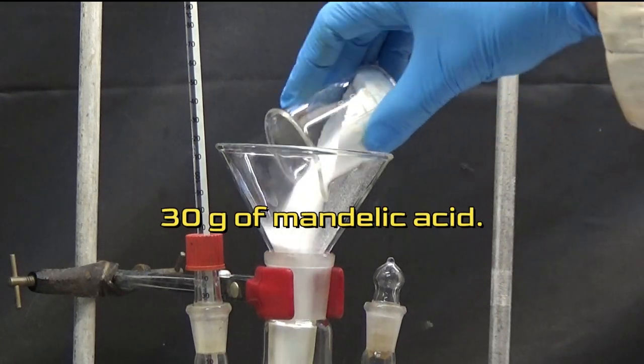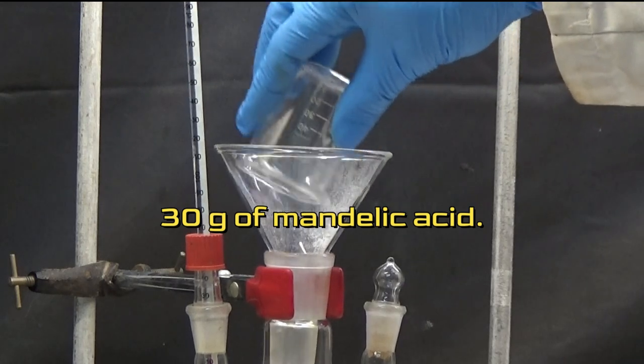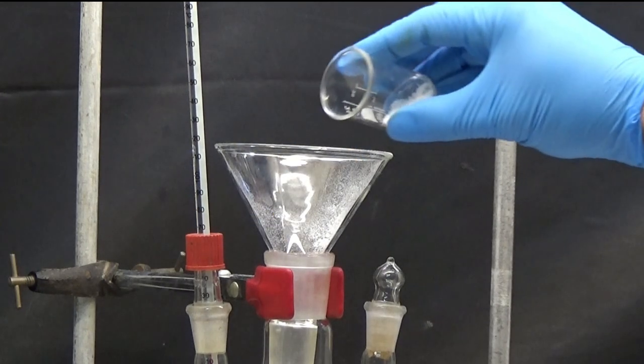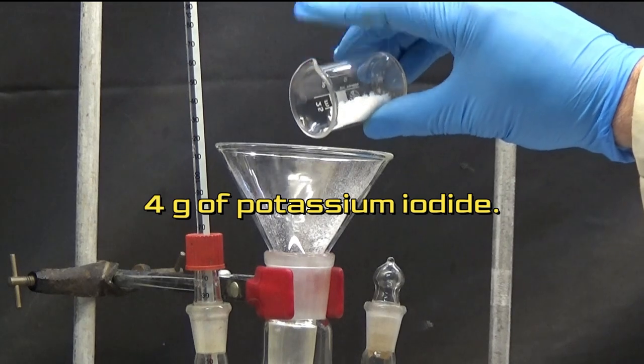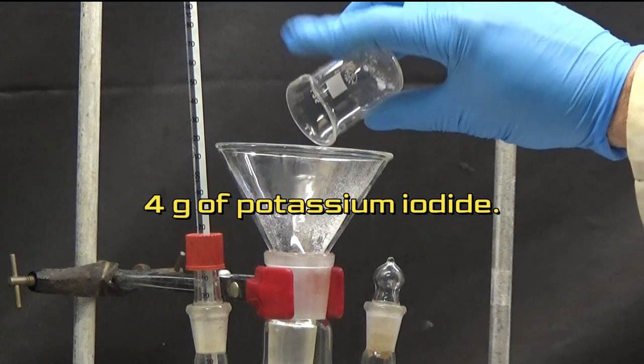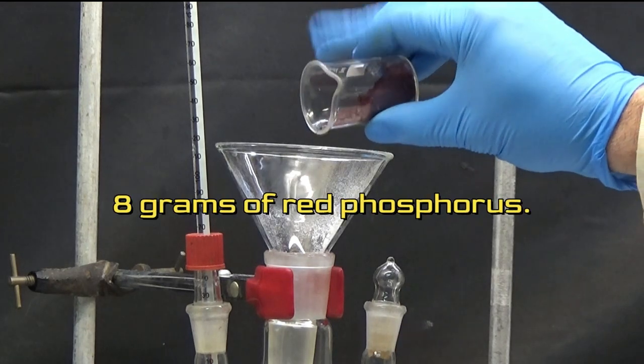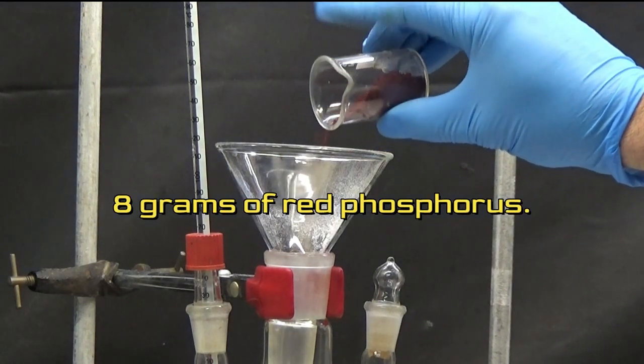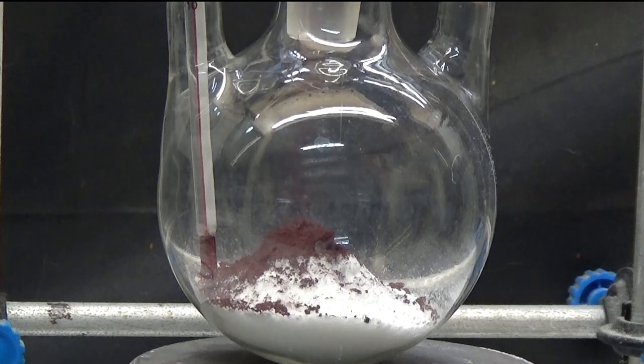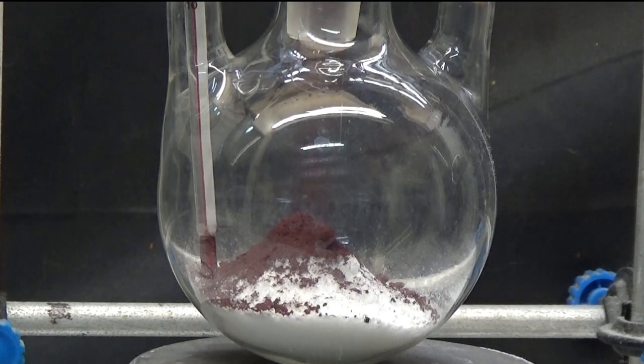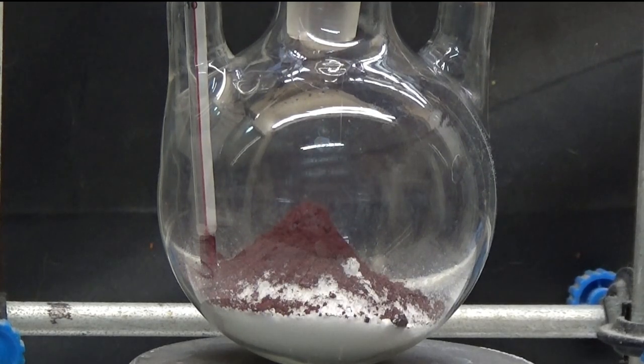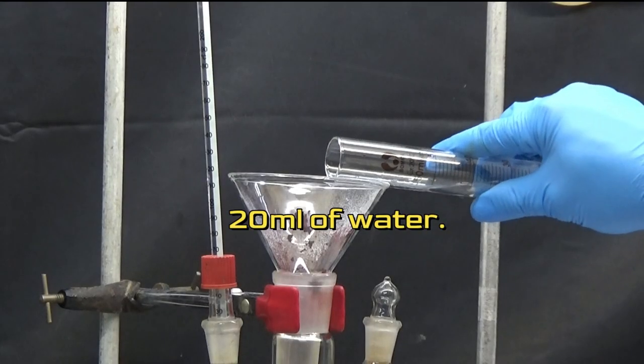30 grams of mandelic acid. 4 grams of potassium iodide. 8 grams of red phosphorus. 20 milliliters of water.